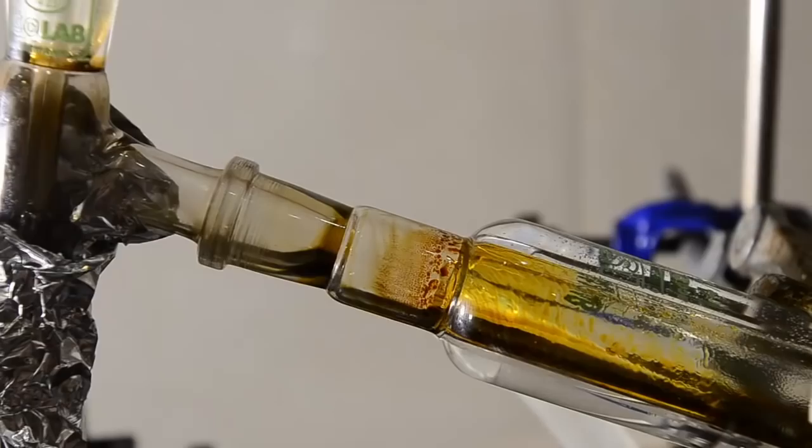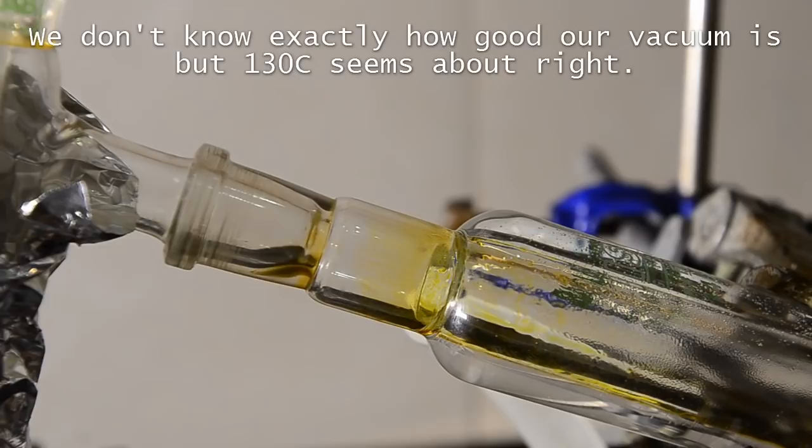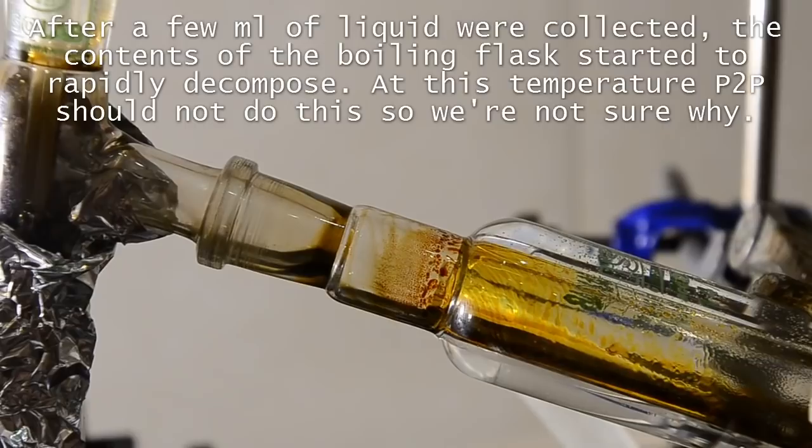Then the temperature rose and the yellow oil remaining in the flask began to distill at around 130 degrees C. We collected a small amount, but then problems struck. Decomposition. The contents of the boiling flask started to turn black. We salvaged the oil collected to that point and stopped distillation.